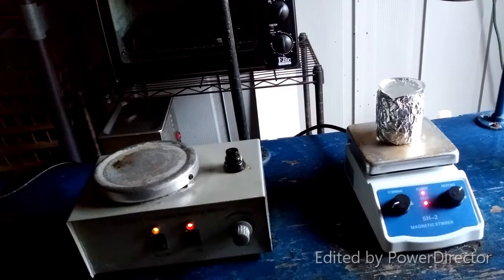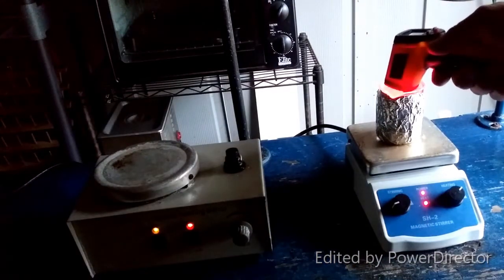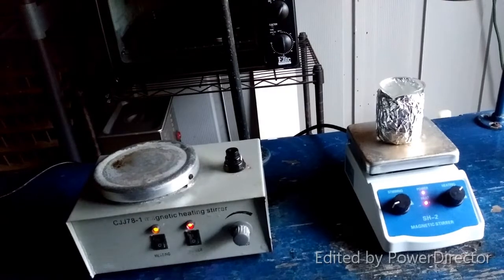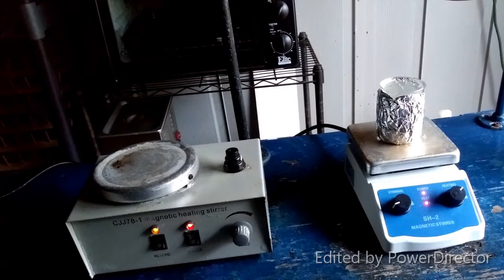I'm sure the temperature is not going too high here. I don't know why they were so specific about 85°C, but the way they wrote it almost makes me wonder if it will start to break down if the temperature goes higher. I just want to evaporate off just a couple mils of water, so I'm going to let it stir and go for a little bit and then I will take it off of here and let it cool down in the ice.